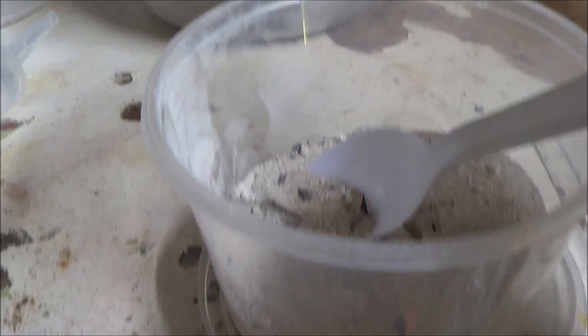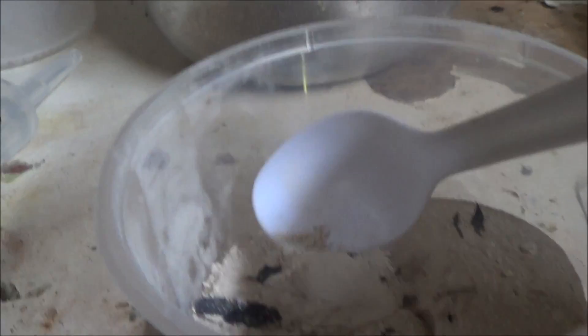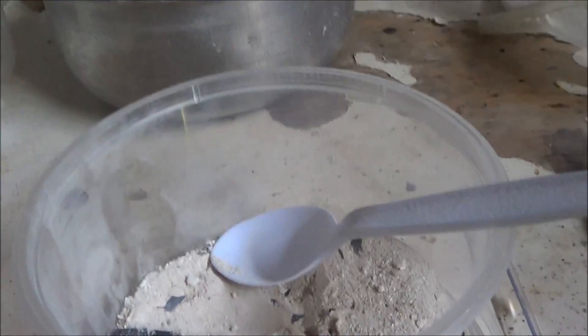And the yield here was 71 grams from the 150 grams we put originally in the fire. I haven't picked out the iron oxide flakes yet. I'll get to that eventually.